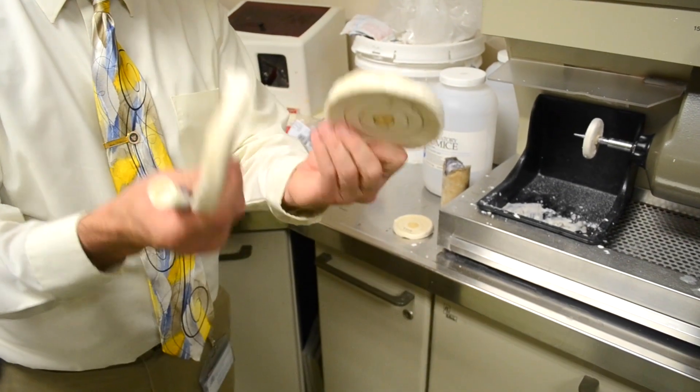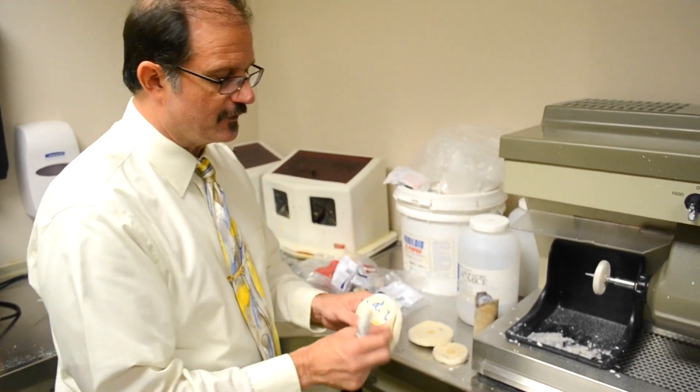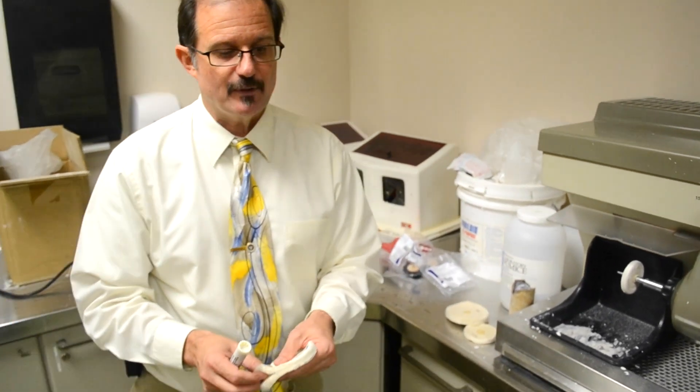You'll get both of them with a lot of compound. In another video I'll show how you can make this a cotton tail, which will actually bring up a brighter shine for your dentures.